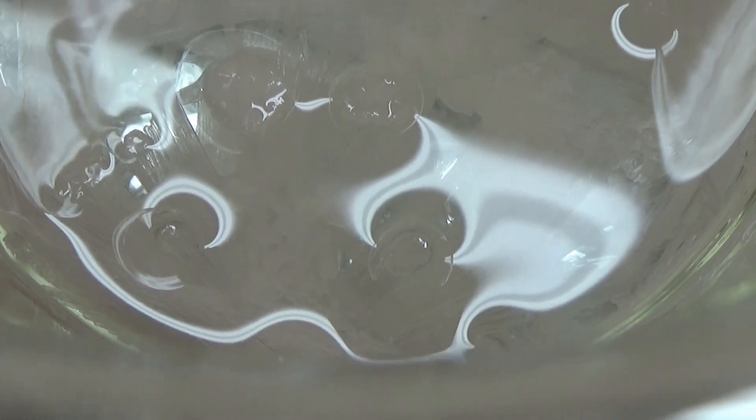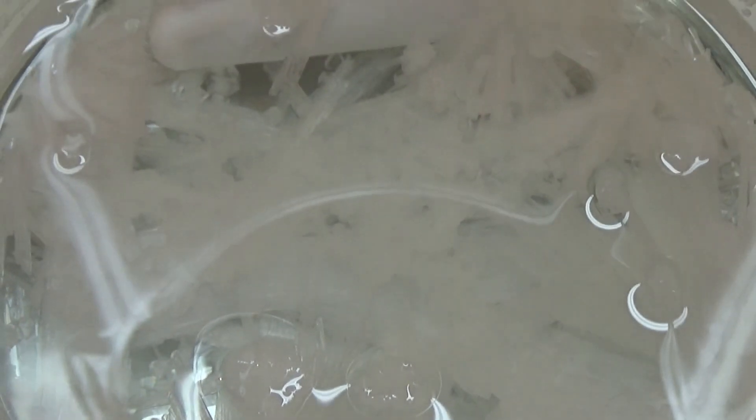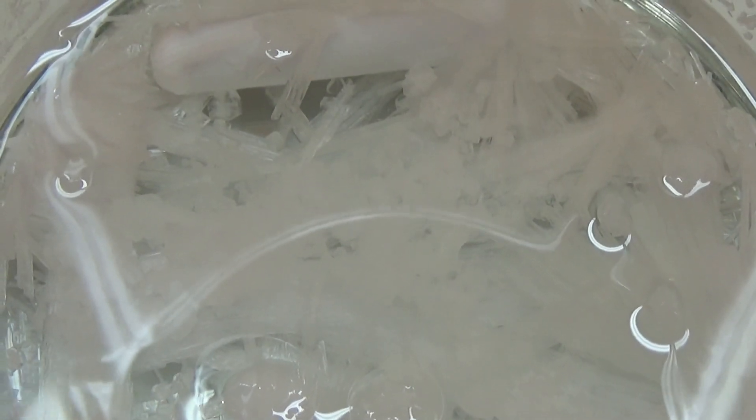The crystals are long, they are fine, and they seem to have a good purity. That's nice. That's very nice, so I will have some good stuff to work with. So then let us filter these beauties off.